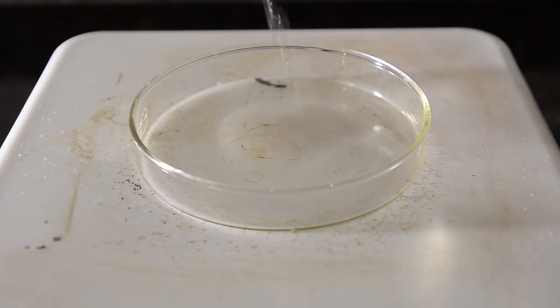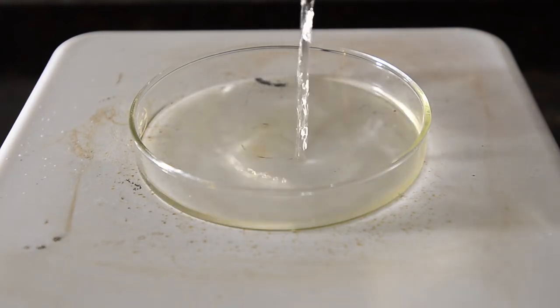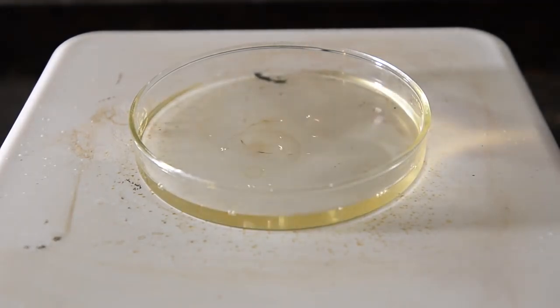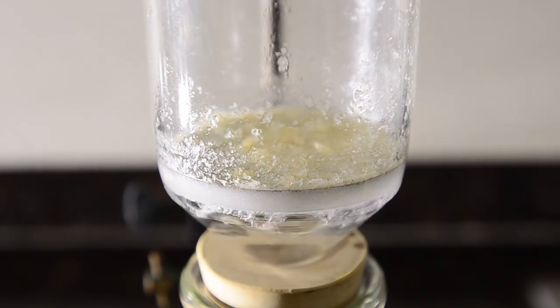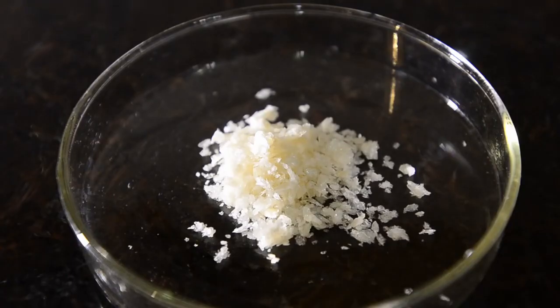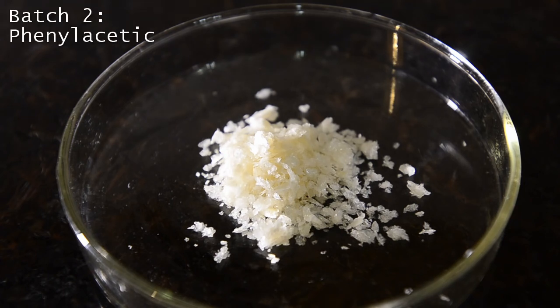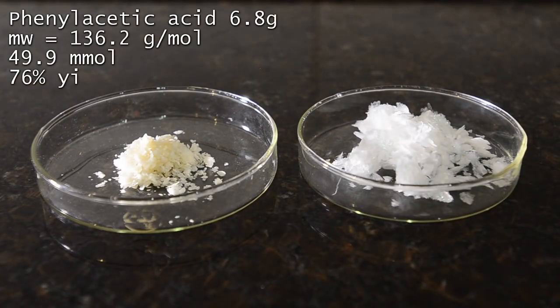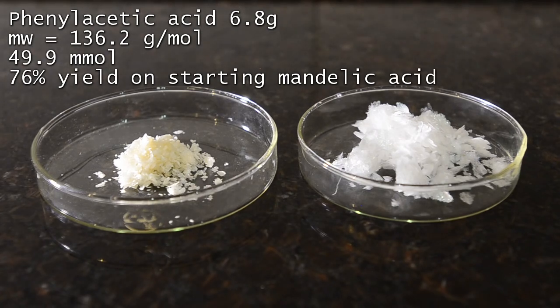And placed this on a hot plate to evaporate the solvent. The result was a syrupy liquid which crystallized as it cooled down. We filtered the crystals and again used a little water to wash them as well as we could. And here's our second batch of product. 1.5 grams of phenylacetic acid, although not as pure as the first batch, as the crystals are less well formed and slightly discolored. Altogether that's 6.8 grams of product, which is a 76% yield on starting mandelic acid.